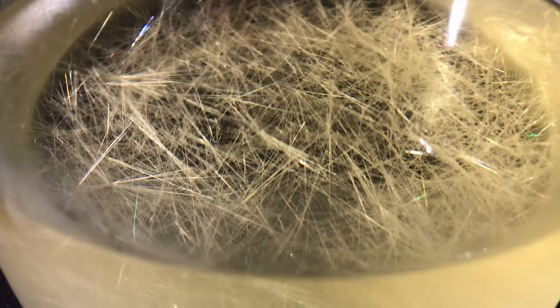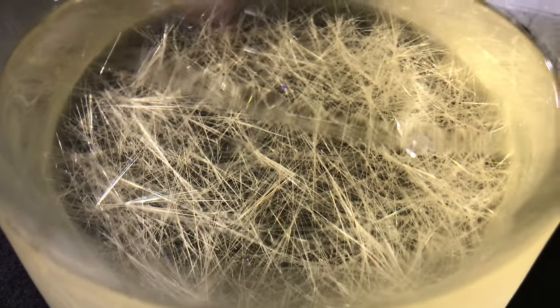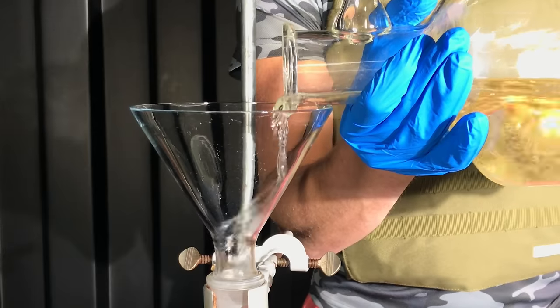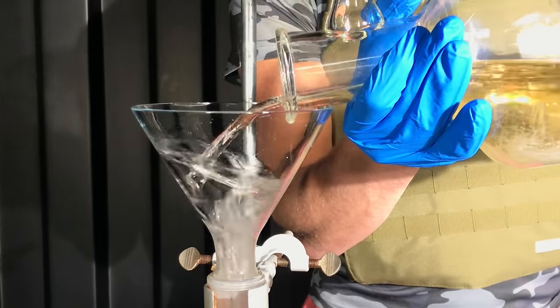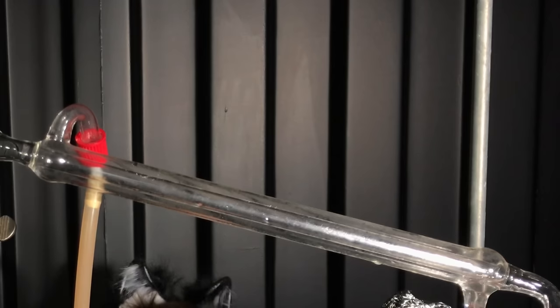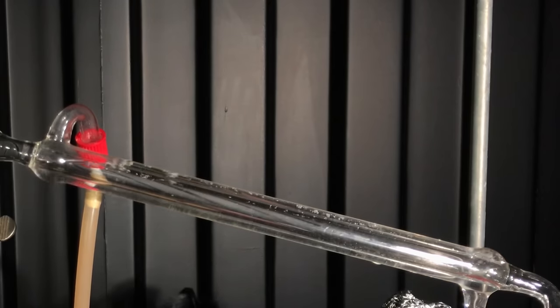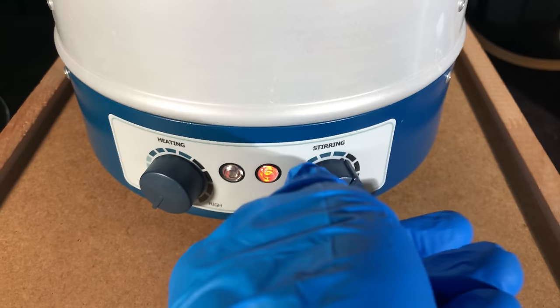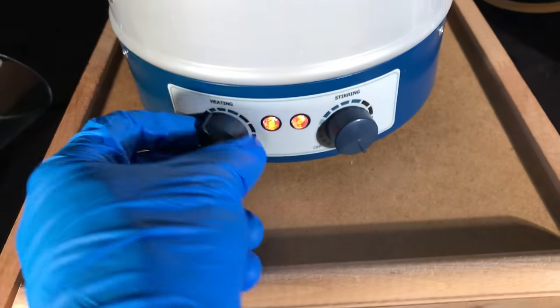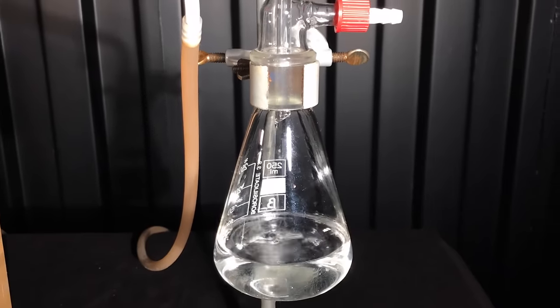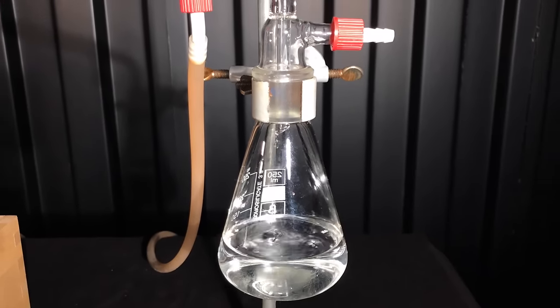What I would normally have thrown away as waste ended up growing mesmerizing crystals. Just like sharks smell blood, a chemist smells an increase in yield here. We won't get much, but I was too lazy to calculate how much would be left. To get more product, you need to get rid of solvents. But not all solvents, as there's excess chlorobenzaldehyde. We will therefore need to find a middle ground and distill until my mind rationally or irrationally decides that it looks good.